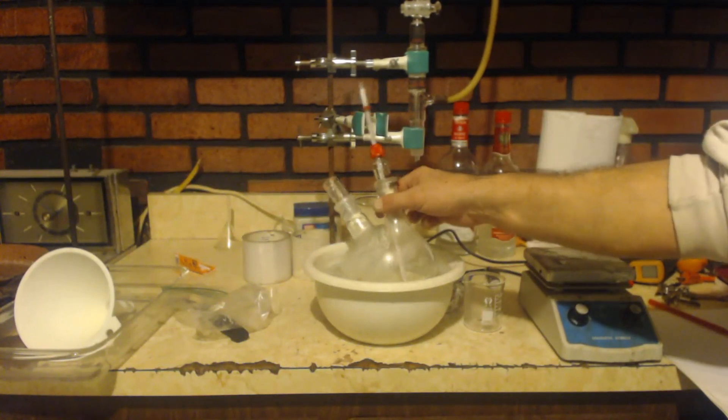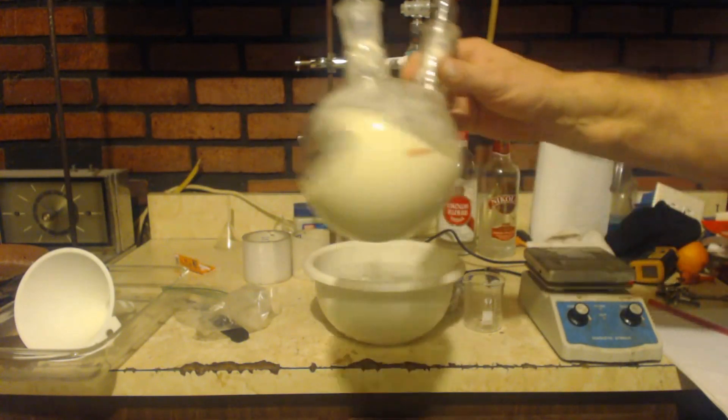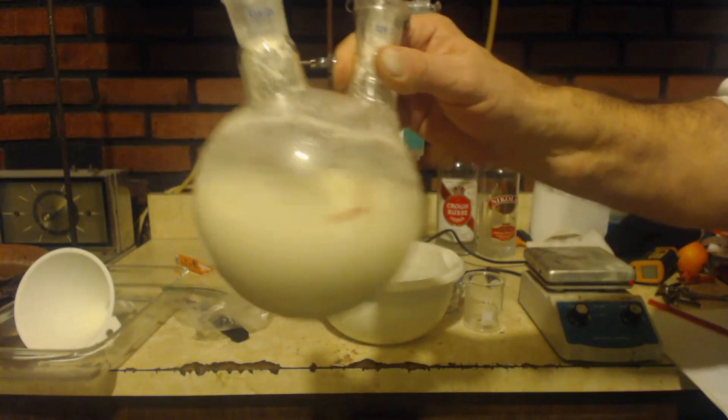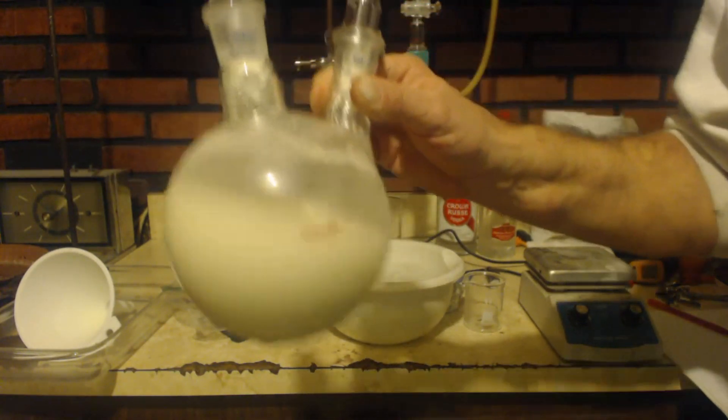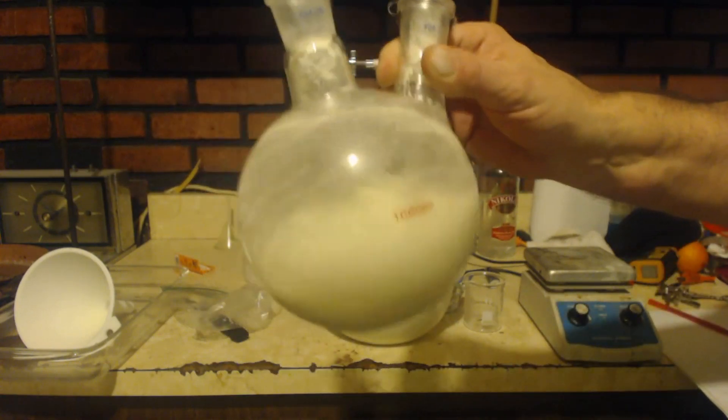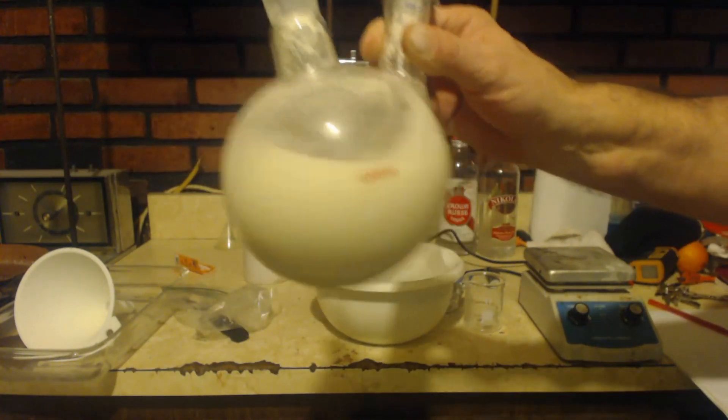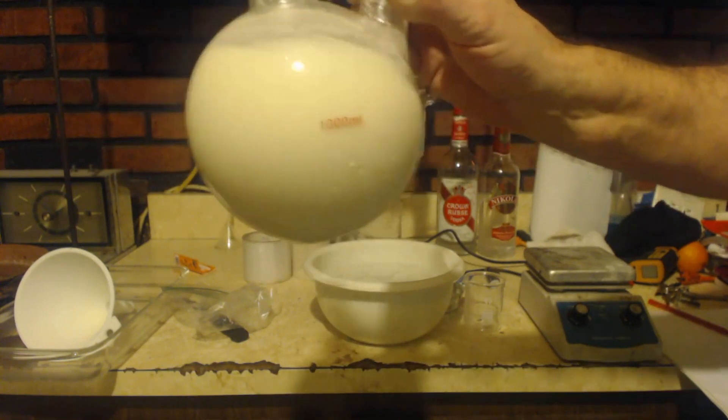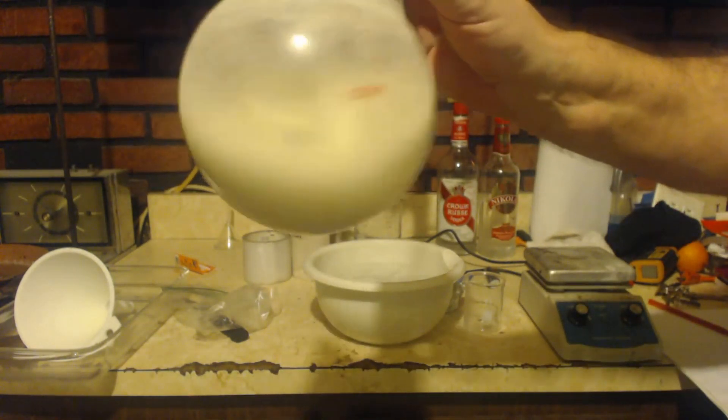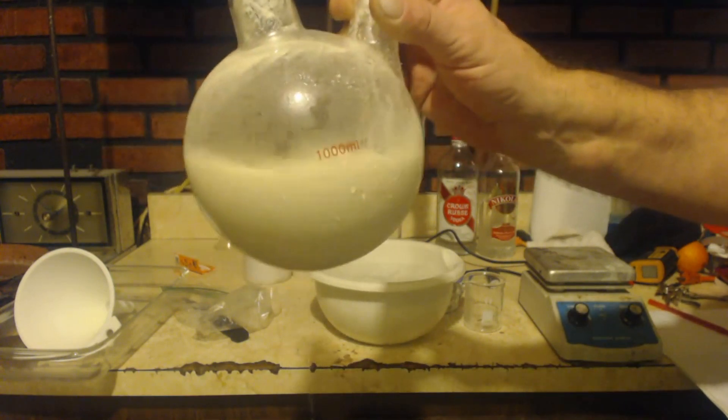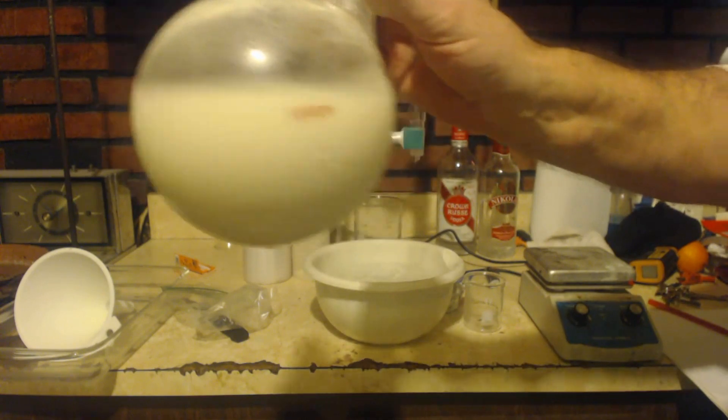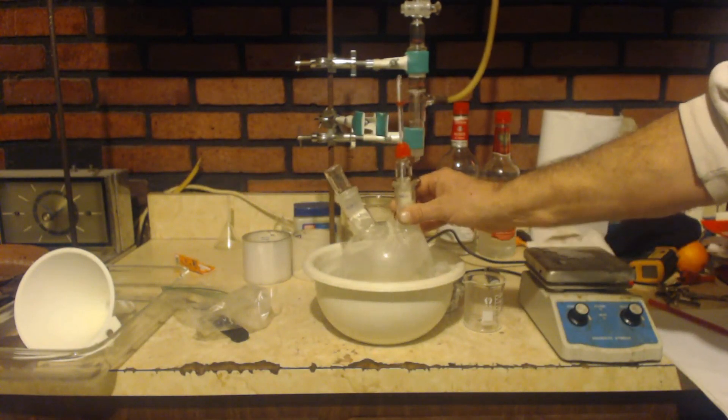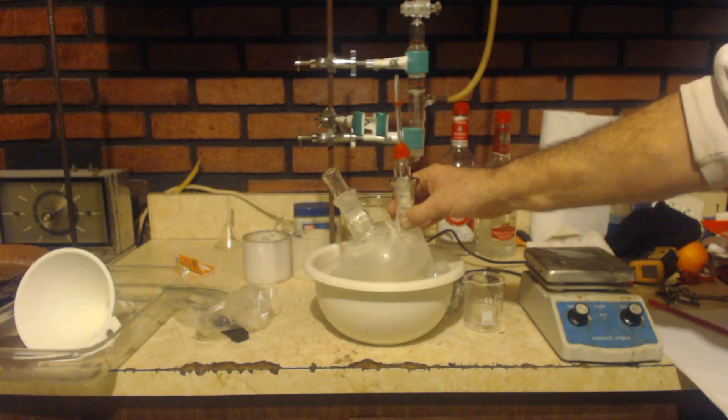Alright, I've made so many mistakes with this. First thing I did was I didn't put it in an ice bath, but I didn't put any ice in it. I just had water in it. So you might as well say I didn't have it in an ice bath. Even though I had it in the freezer, the water wasn't cold enough. And the first initial thing that I put in there was about 7 milliliters. It took the temperature up slowly to 30 degrees Celsius and stayed there for a while because I didn't realize I didn't have any ice. I just didn't think.